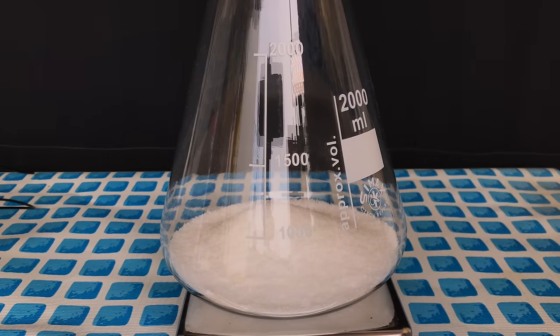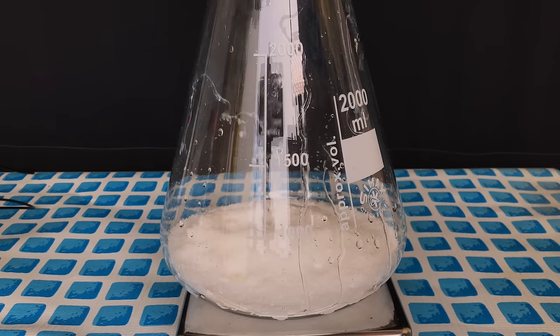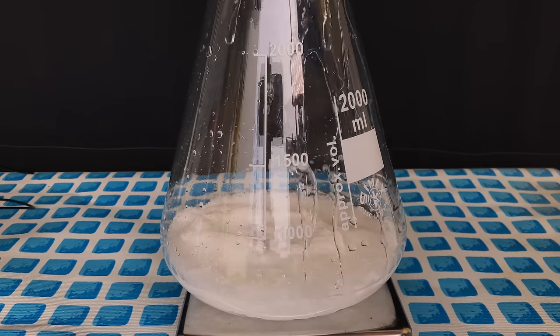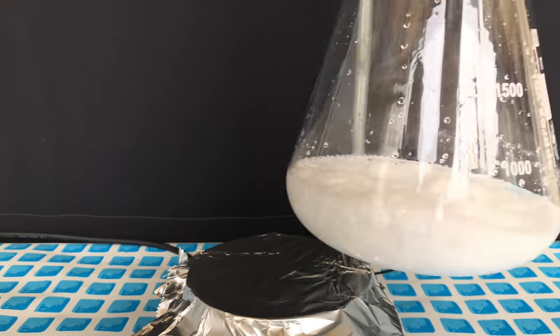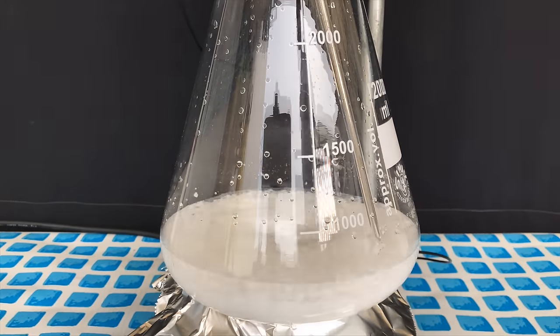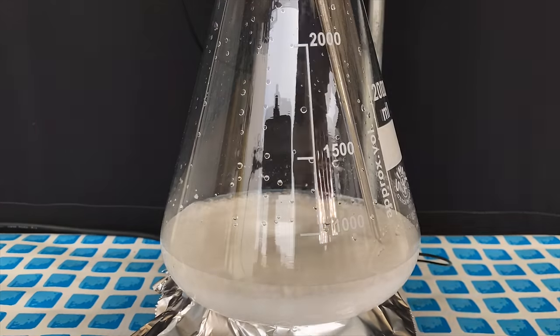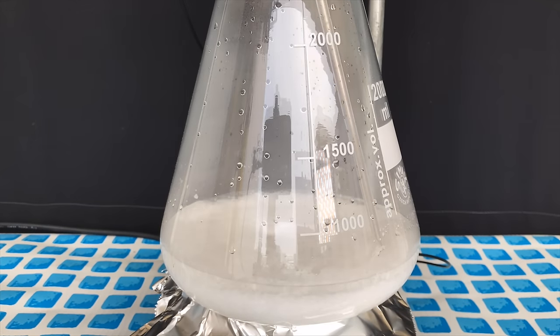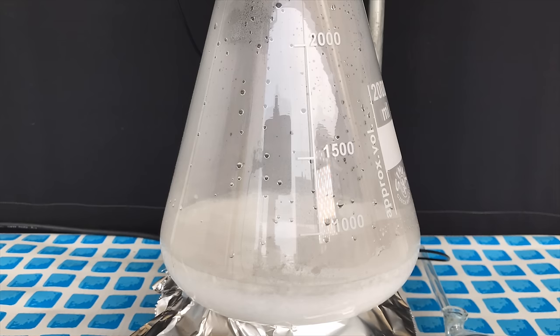Only mixing two powders is not really going to help, therefore we need a solvent. We used 330 grams of distilled water. To make the powders react, everything was placed on the hotplate, and I even added an electric thermocouple. The hotplate was set to 85 degrees Celsius, with the thermocouple inside of it. You don't want to heat the solution too much.